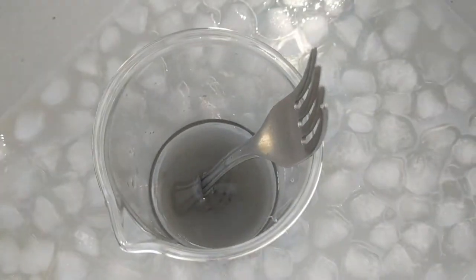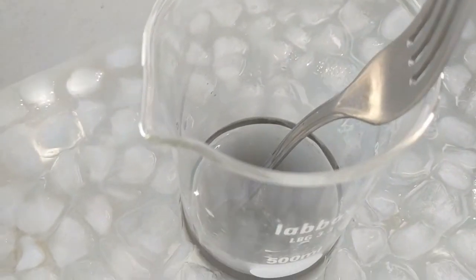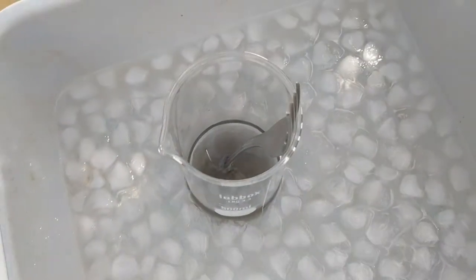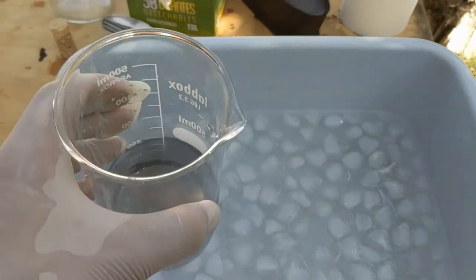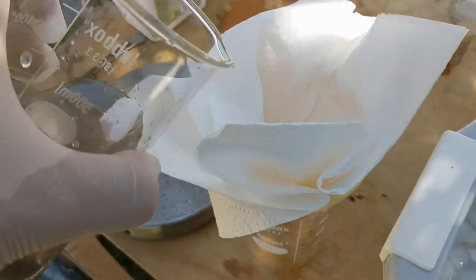I've added it all and I've been stirring for a while — this is just taking a sweet time to dissolve. I guess that's because it's cold, and it was probably quite a solid block since it solidified from being a molten salt. That makes sense. Just keep stirring and it does dissolve.